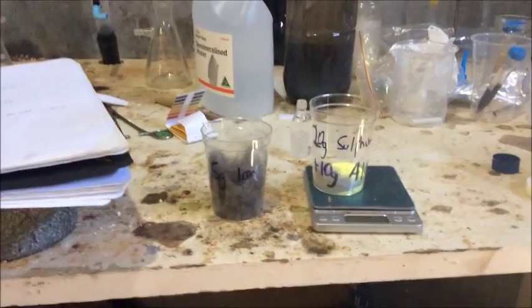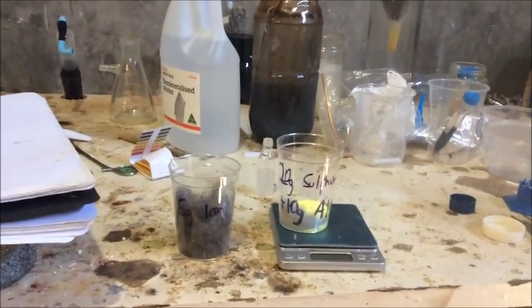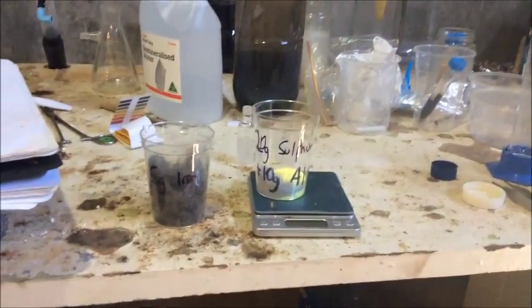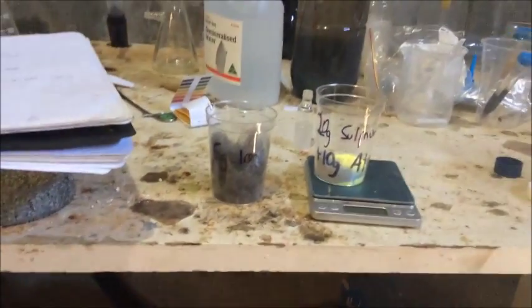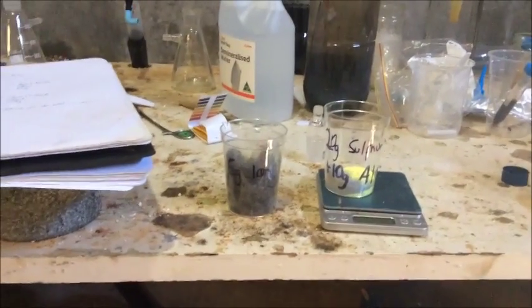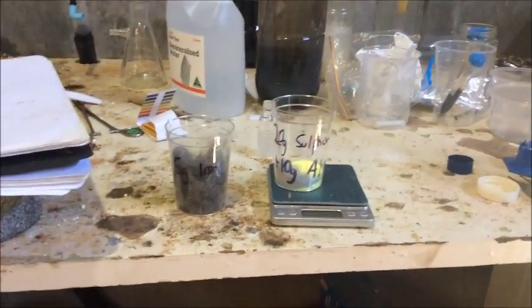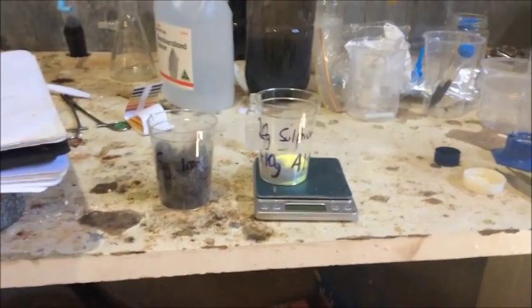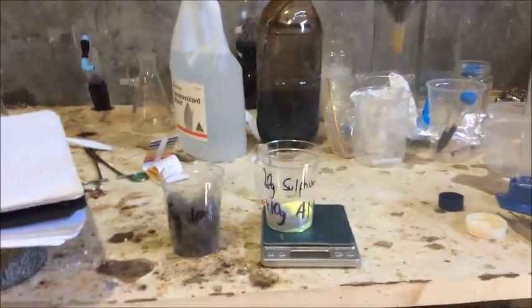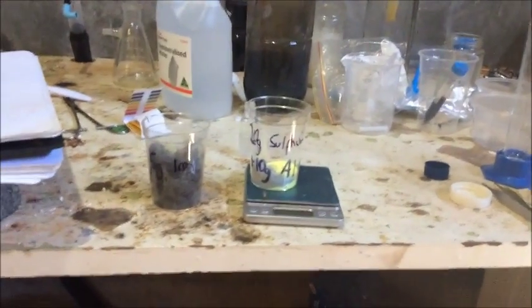So what are we doing in this episode? We are making sodium sulfide, which will selectively reduce only one of the nitro groups in the picric acid. This isn't easily done — we don't have a great selection of reducing agents for this. Too weak a reducer and you won't reduce any nitro groups; too strong and you'll reduce two or three. Sodium sulfide seems to be a great one. Quite often this is made by the direct reaction of sodium hydroxide and sulfur, which makes a sort of blood-red polysulfide solution.